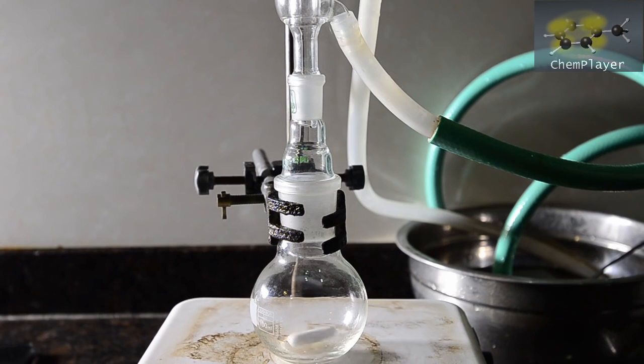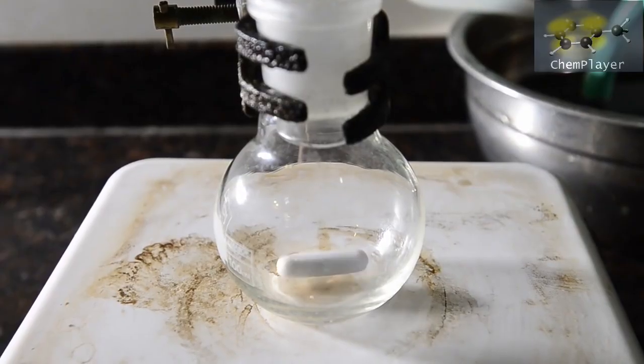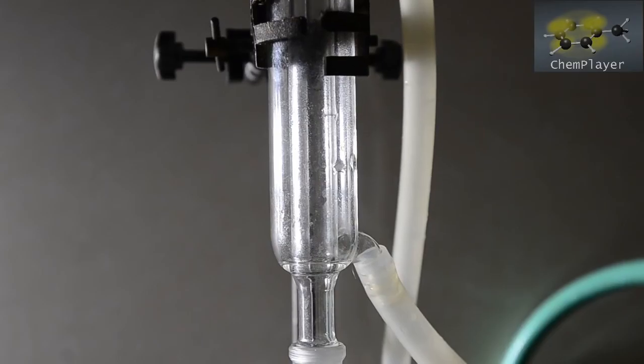Here's our setup for the reaction. We've got the 100 ml flask set up on a hot plate with magnetic stirrer, and a small Liebig condenser set up on top. Let's get some water flowing.